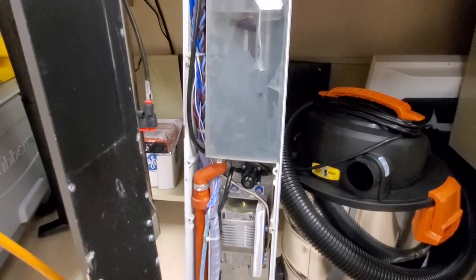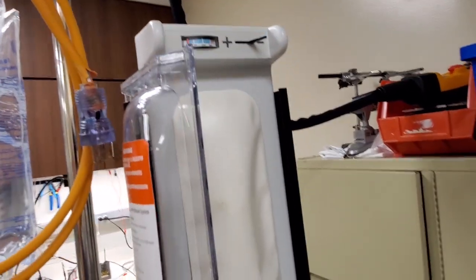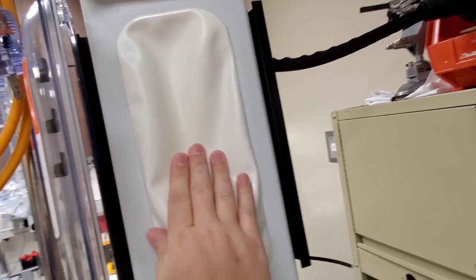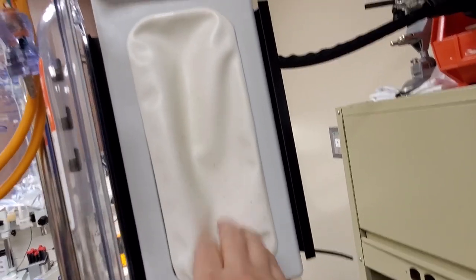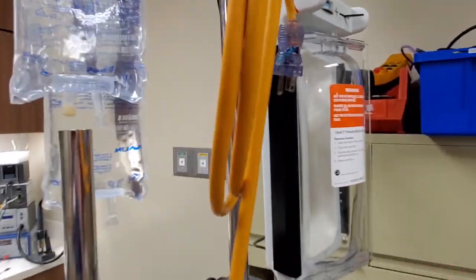So anyway, besides the leaks and besides setting the air pressure, the other unit that's going to give you issues are your pressure chambers. Either because you will have a leak in your bag right here, your bladder, or because you will have a leak someplace in line.